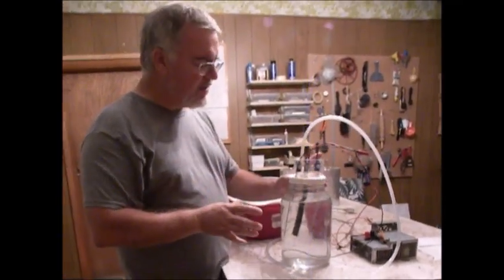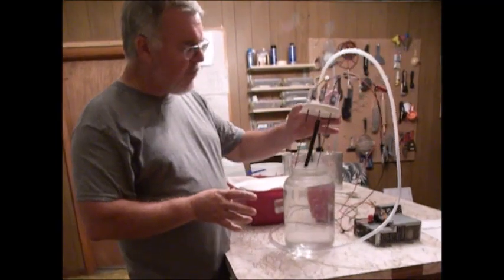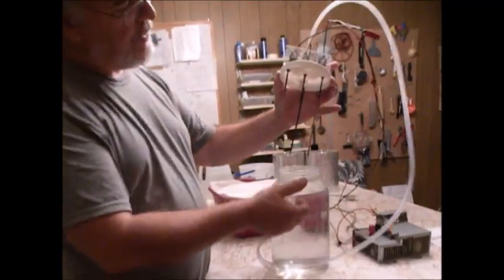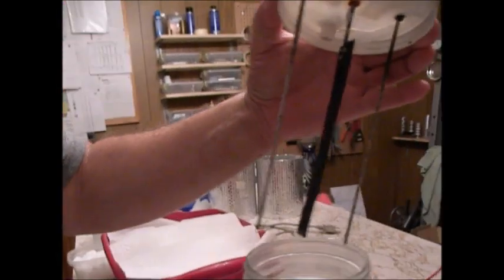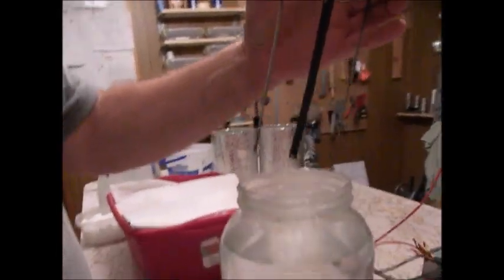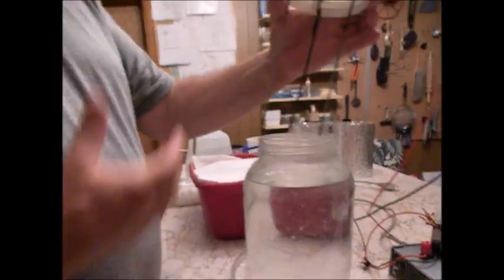I concluded that the temperature that I like it to operate at is 140 degrees. That is not absolutely critical, but anywhere from 120 to 180. Now the reason that I mention 140 degrees is - and I'll pull this out - we've got two outer electrodes and an inner electrode. They create an electrolysis process.